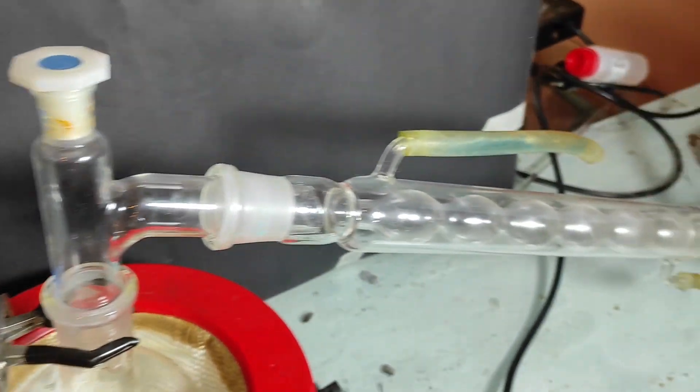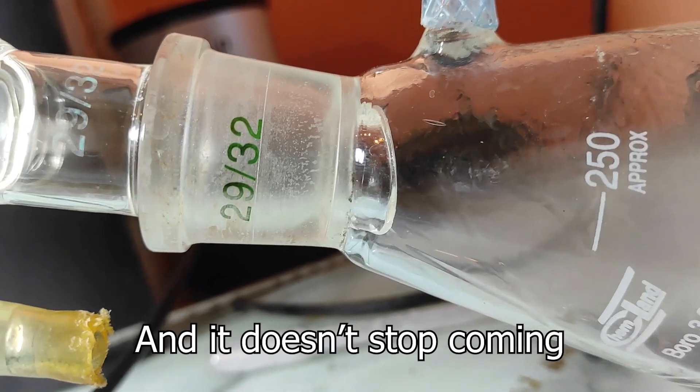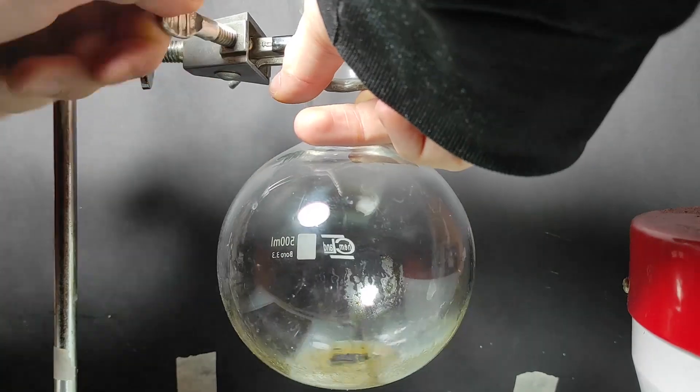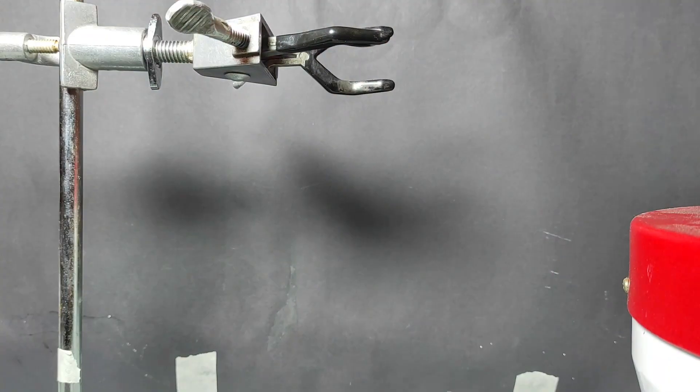Then I've assembled a distillation apparatus. So the heat comes coming and it doesn't stop coming. Fed the flask and the solvent starts running. Finally, this is what's left in the flask and it has some nasty green oil at the bottom.